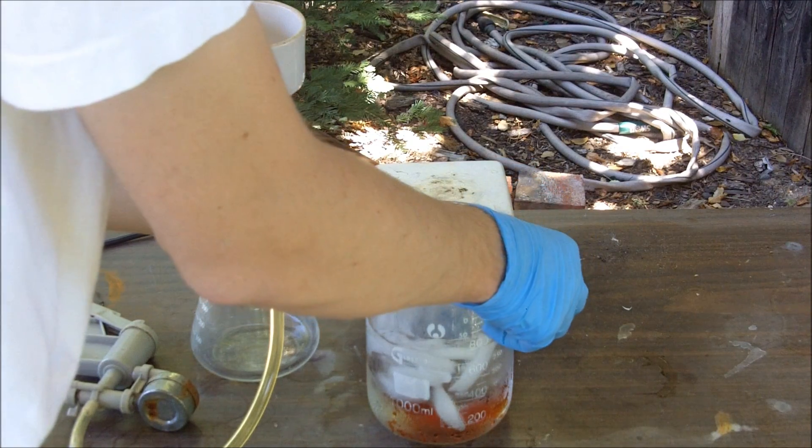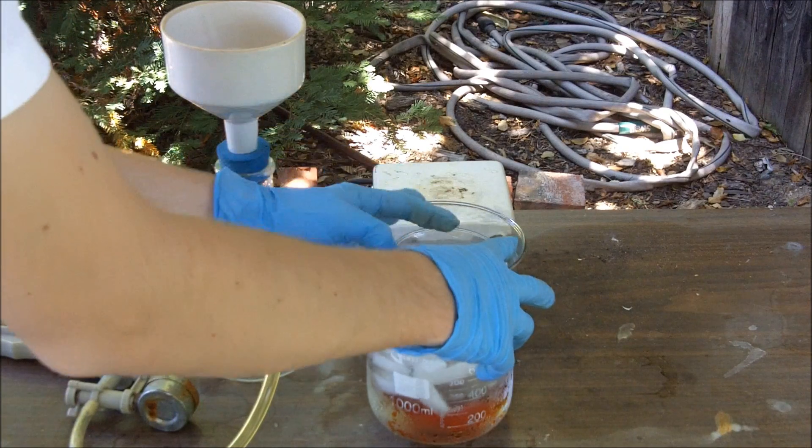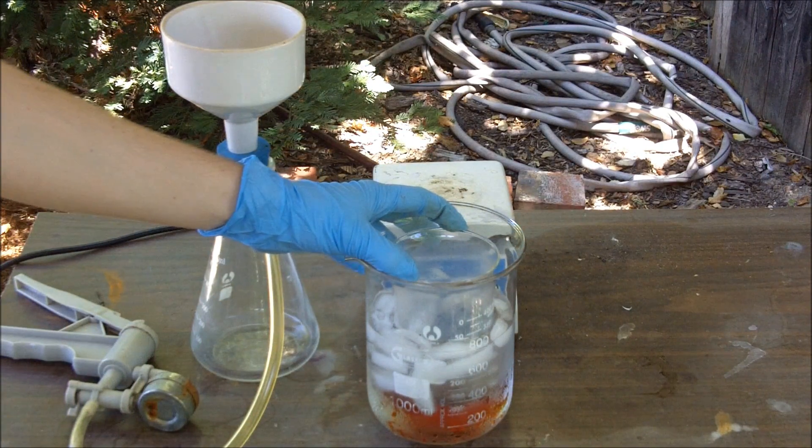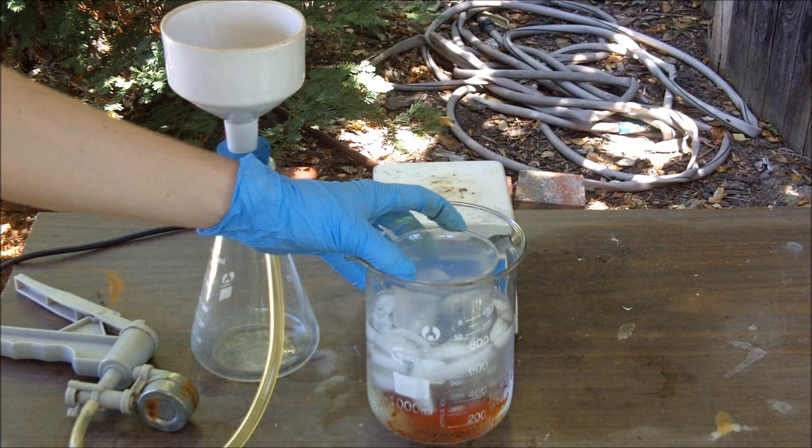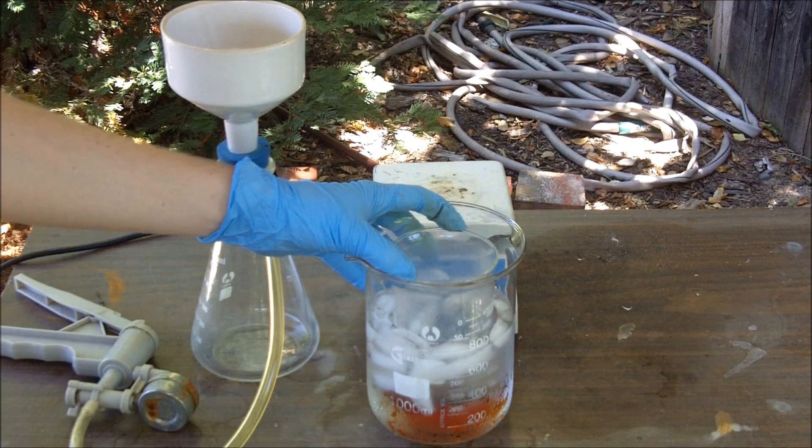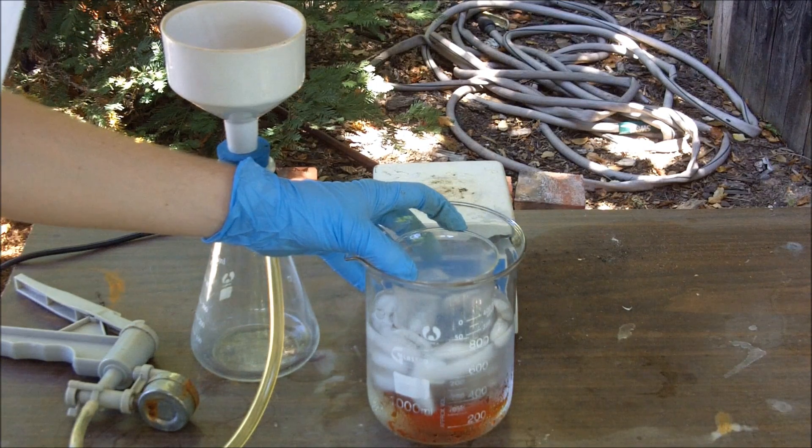So once I see crystals of hydrazine sulfate, I will go ahead and vacuum filter it in this vacuum filter here. Okay, it is starting to crystallize so I will get back to you once crystallization has finished.